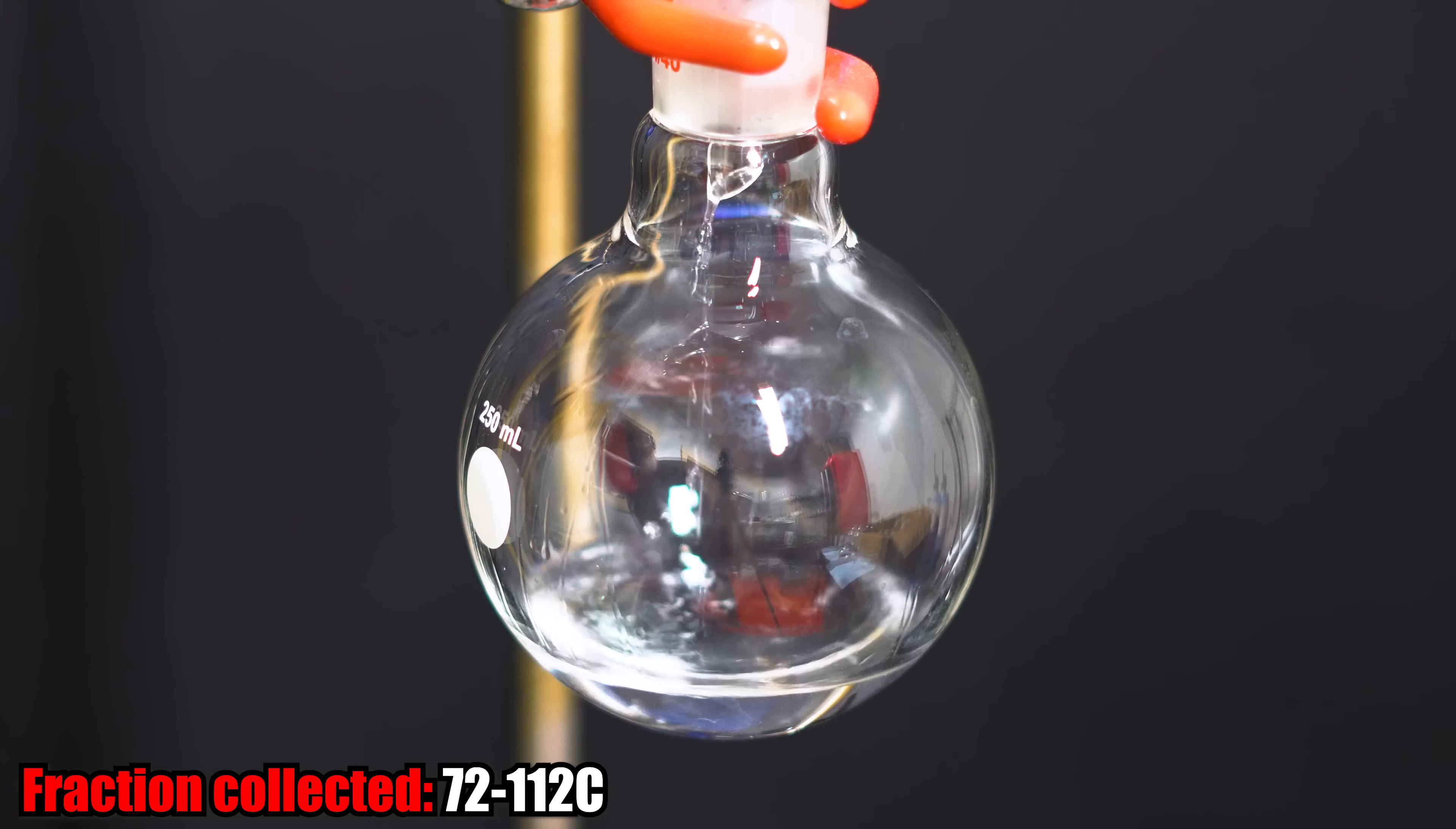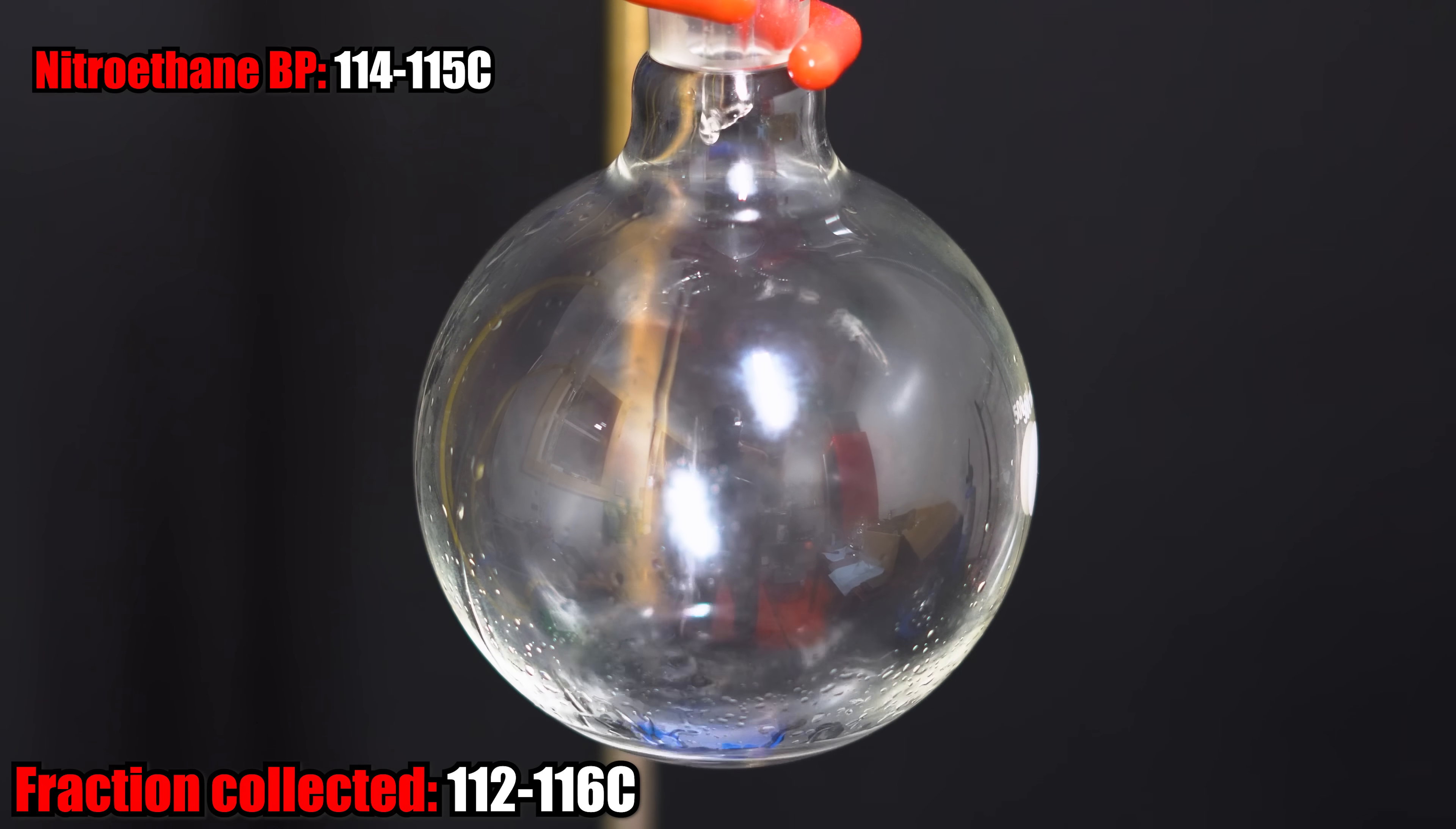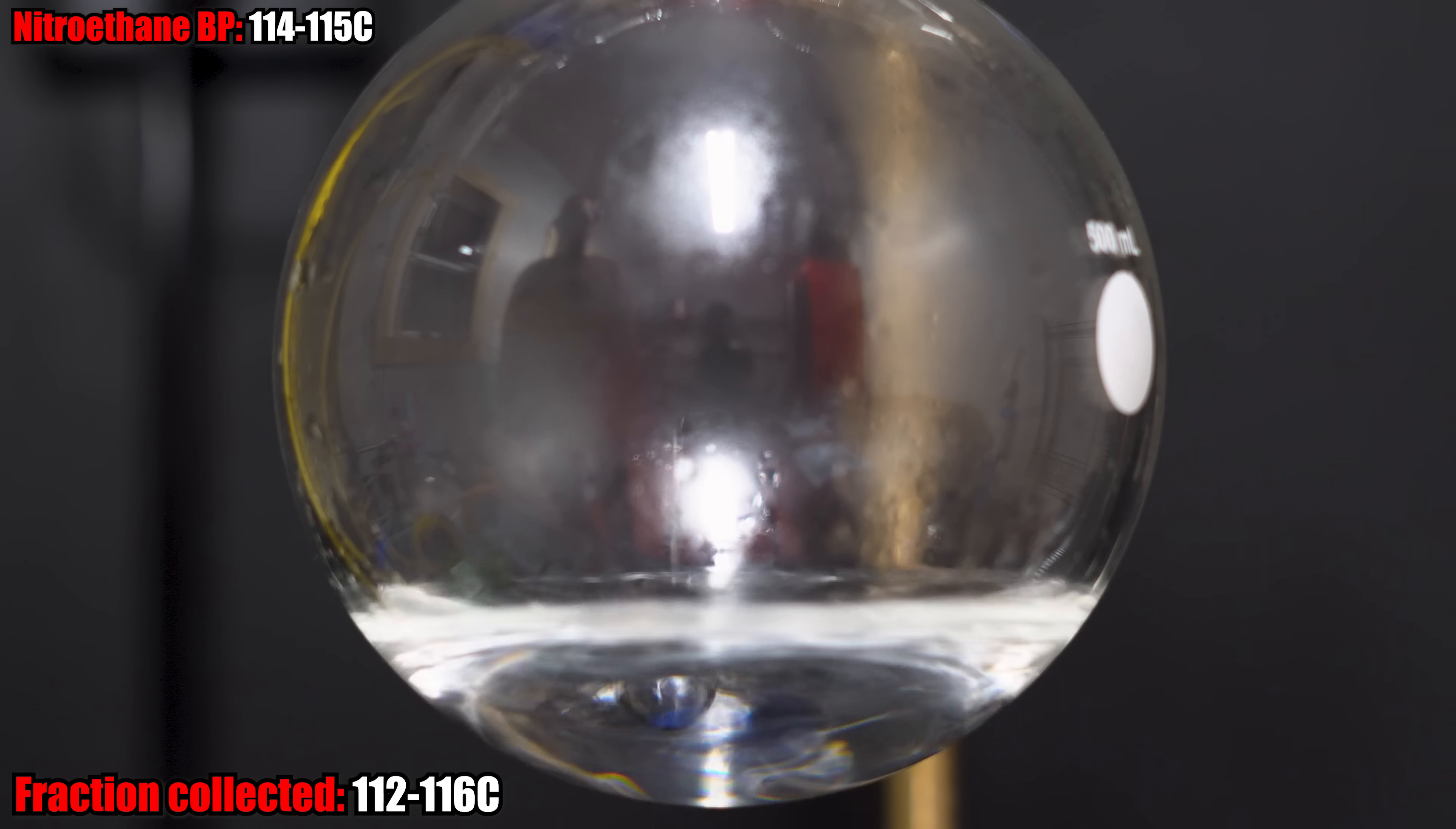I decided to collect this fraction all the way up to about 112 degrees Celsius. Once it was at that temperature, I decided to switch out the flask and start collecting the nitroethane. There was a huge gap between the ethyl acetate and nitroethane boiling point, so I thought it would be okay to start at this temperature. It did rise up to about 114-115 degrees Celsius, and it stayed there for a while. The second this fraction hit 116 degrees Celsius was when I was going to remove the flask. Since butan-1-ol's and nitroethane's boiling point are so similar, I wanted to minimize the amount of butan-1-ol that comes into the nitroethane.